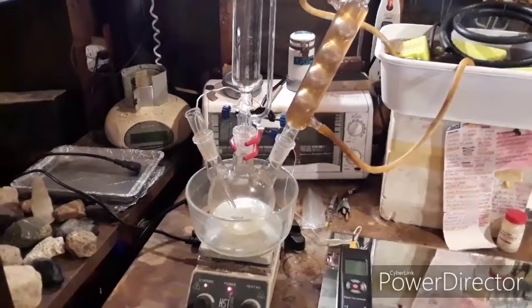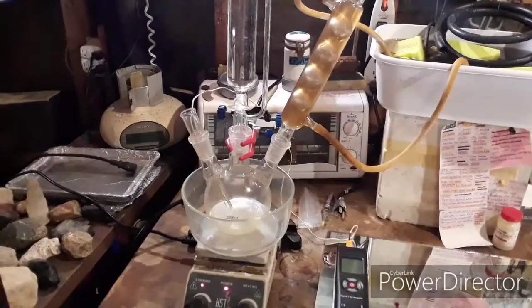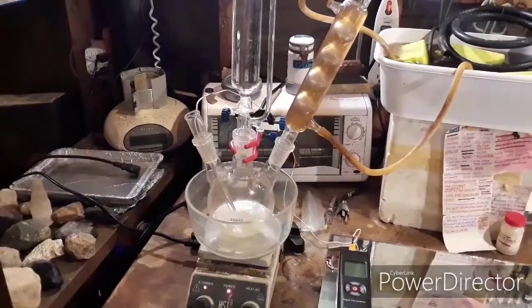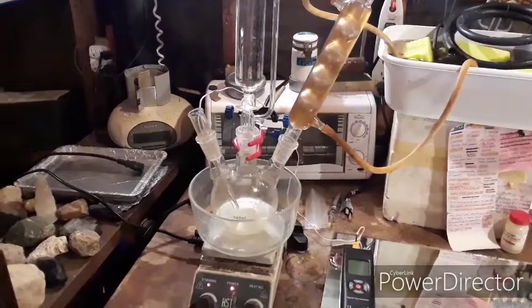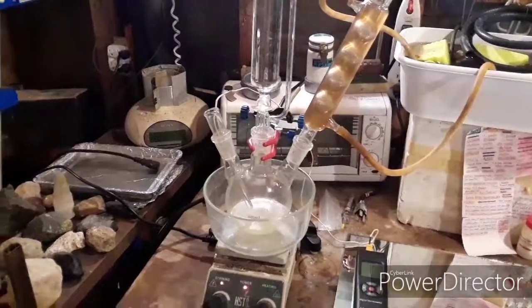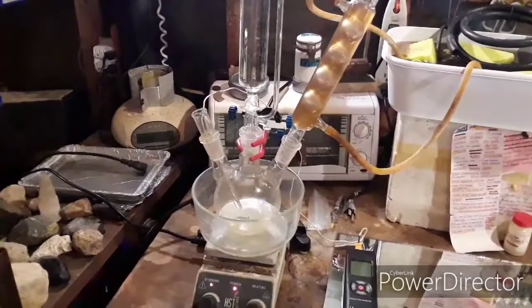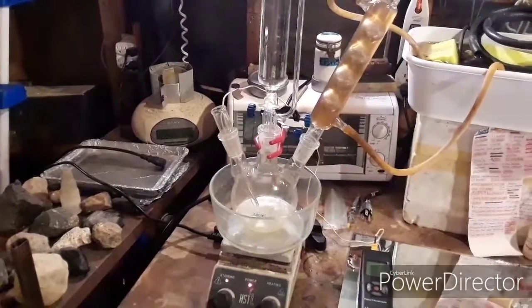That brings me back to recovering your acids afterward, which I recommend because azeotropic sulfuric acid is pretty expensive and azeotropic nitric acid is even more so. When you go to distill it, as long as you have stoichiometric ratios, you should not get much nitric acid back — only water and your 98% sulfuric acid. And that's all there is to making nitrotoluene.